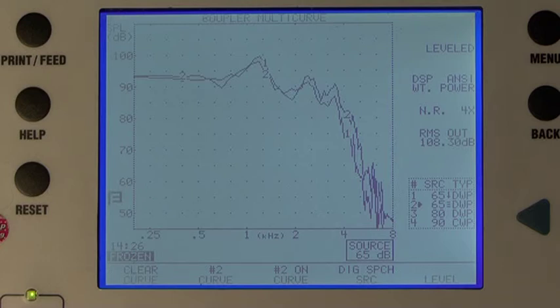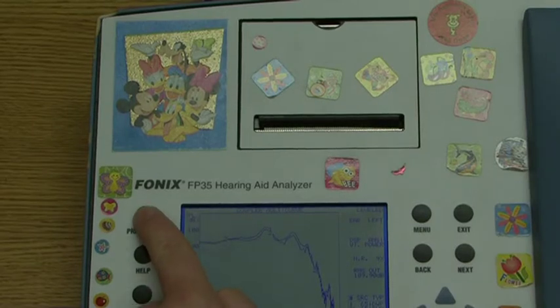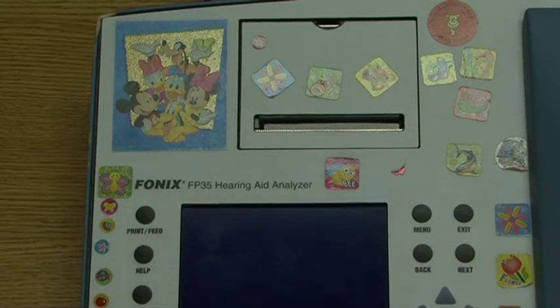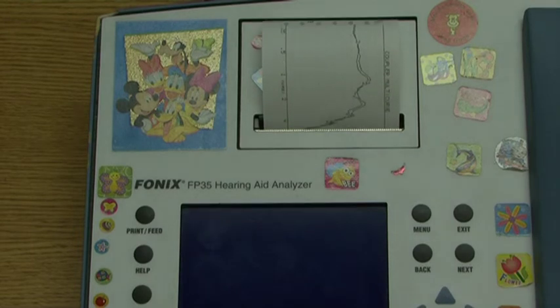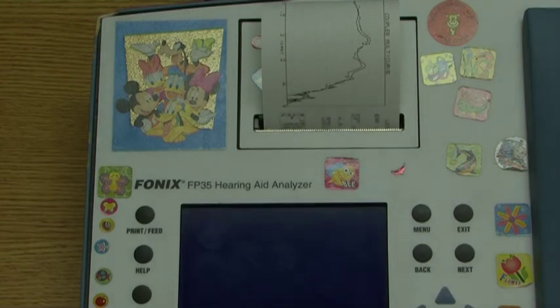Press print to save the frequency response curves for future comparisons. It is possible to save the responses to a computer via a serial connection lead, and an example of this is shown in the Extras section.